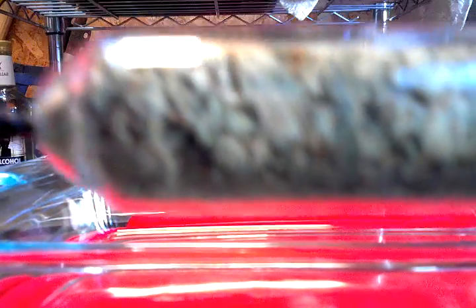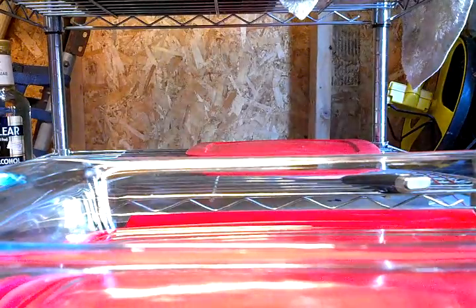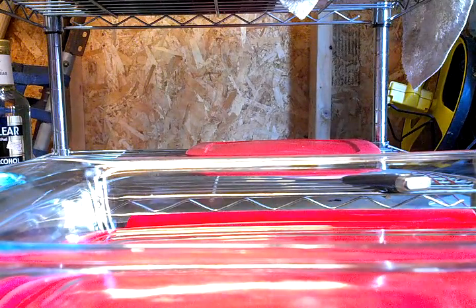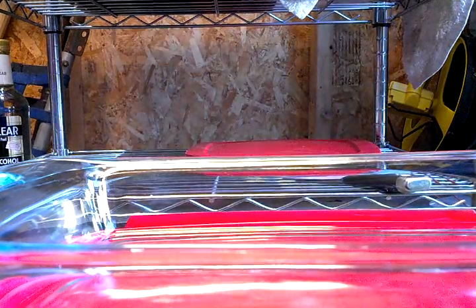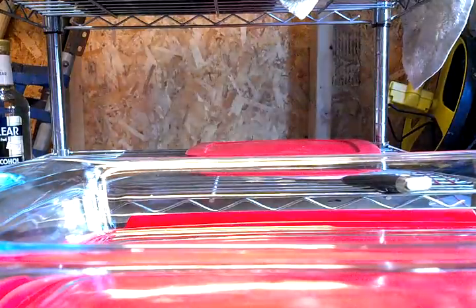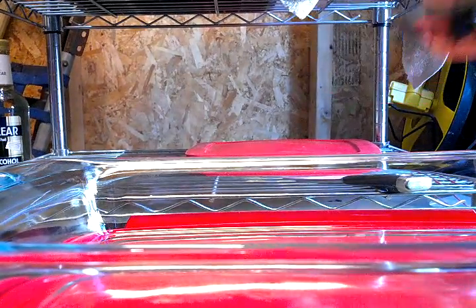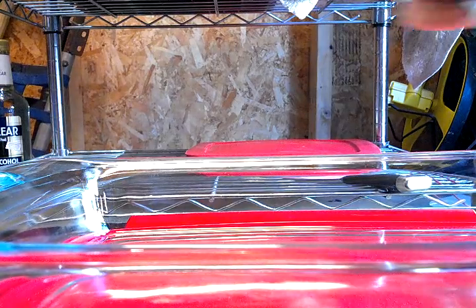But this is really tight, so we'll see how it goes. I think I'm going to have to go through two tubes, so we'll see how it goes.